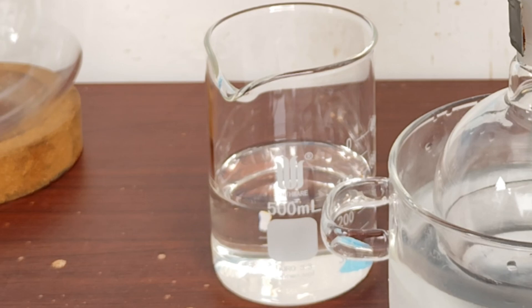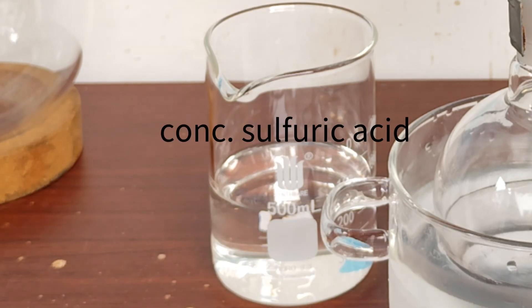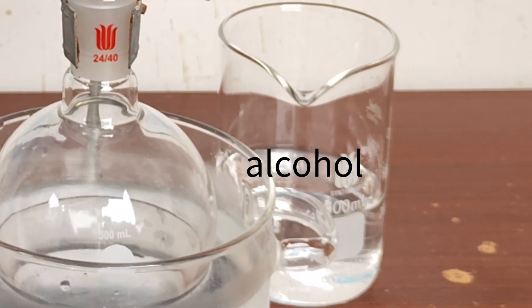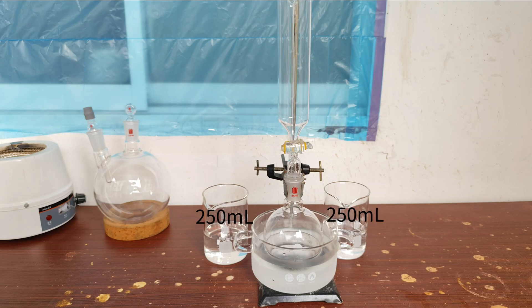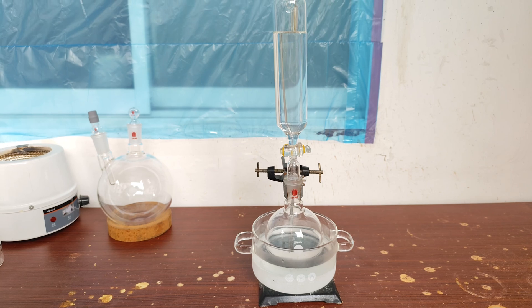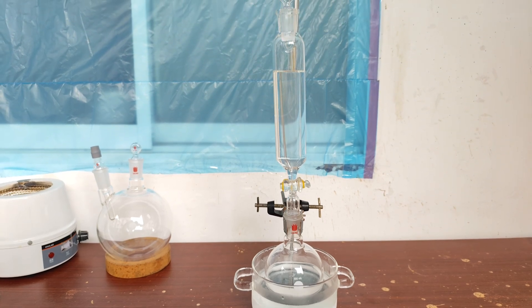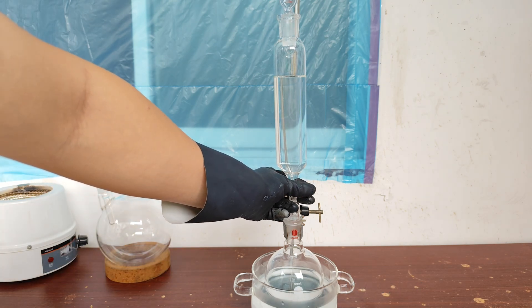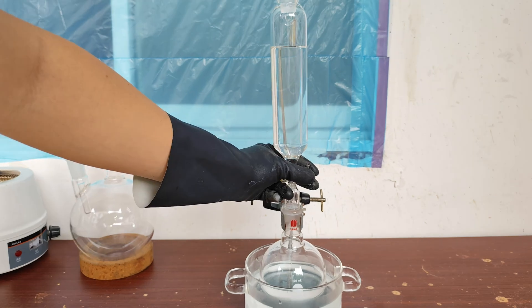To provide the strong acidic environment and absorb the produced water, I choose to use concentrated sulfuric acid and equal volume of anhydrous alcohol, totally about 500ml. Since the mixing step would release a lot of heat, I keep the flask with alcohol in icy water and add the acid slowly by turning on the stopcock of the dropping funnel a little bit.